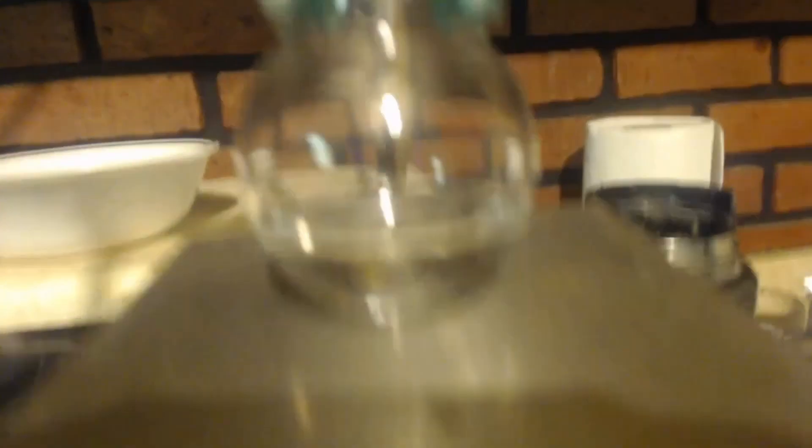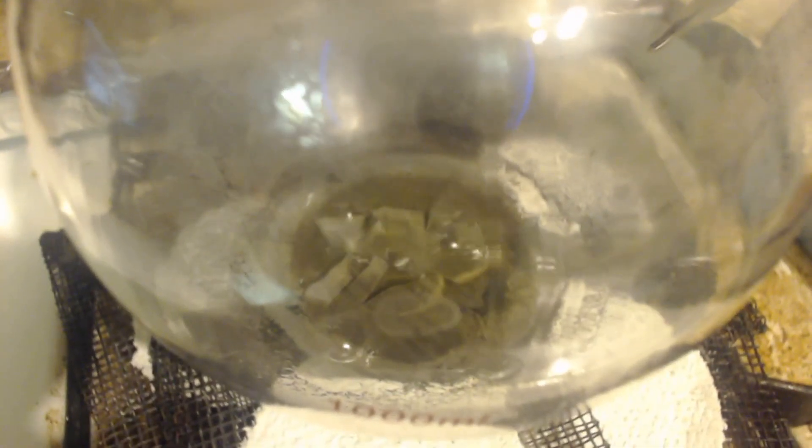Well, it's about 80 degrees now. I wish it would hurry up and get up to 110, 112, I'd be more happy. This is what, after I got the diethyl ether out, this is what's been coming over so far. Like I said, it's up to 80 C right now. So I'm going to have a very low yield. Although my expected yield was only like 30 milliliters or something like that.